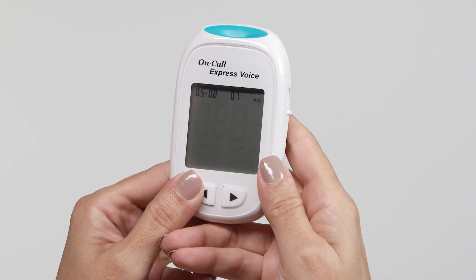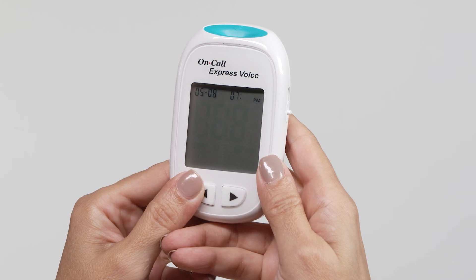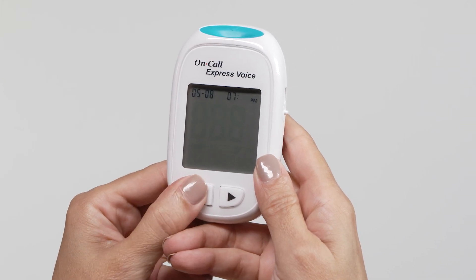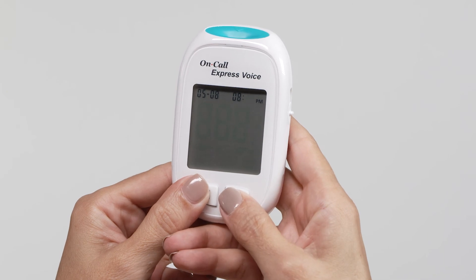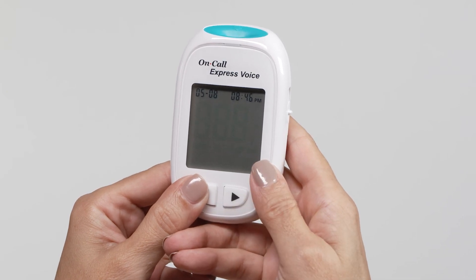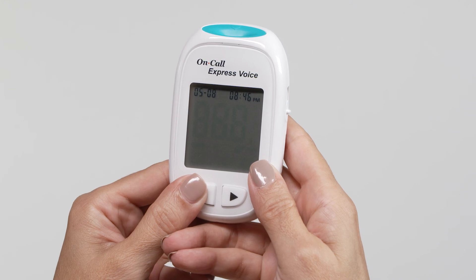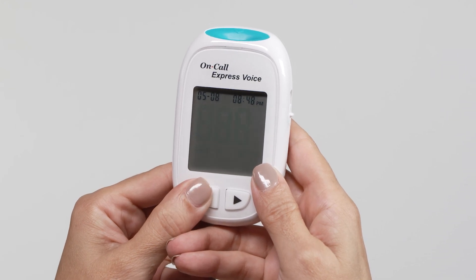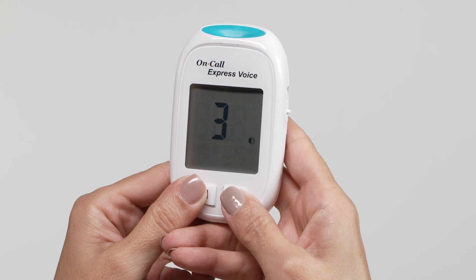Next, the hour will appear at the top of the display. Adjust the hour with the left button until the correct hour is displayed. Press the right button to save your choice. After setting the hour, the meter will display minutes. Press the left button to change to the correct minute, then press the right button to save your choice and move on to set the volume.